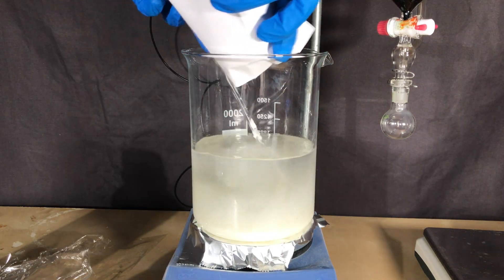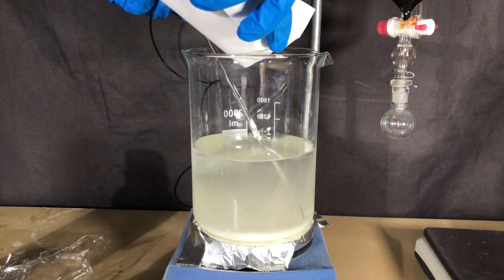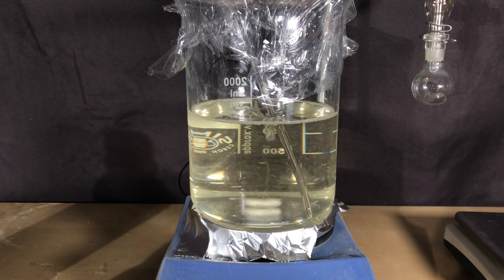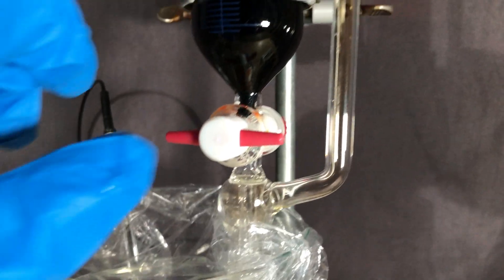The vanillin was chucked in and we turned on the stirring to dissolve it. The vanillin dissolved rather well and within about 5 minutes we are ready to continue. We do not need to heat, we only need to stir.